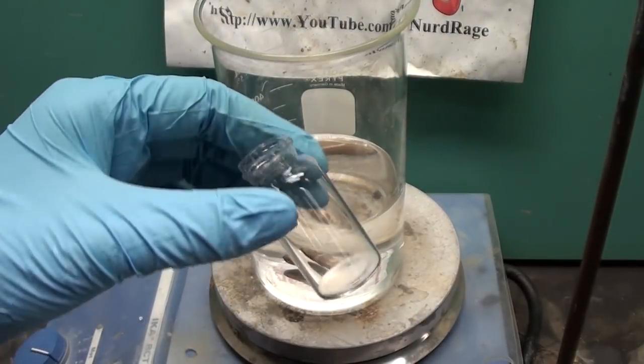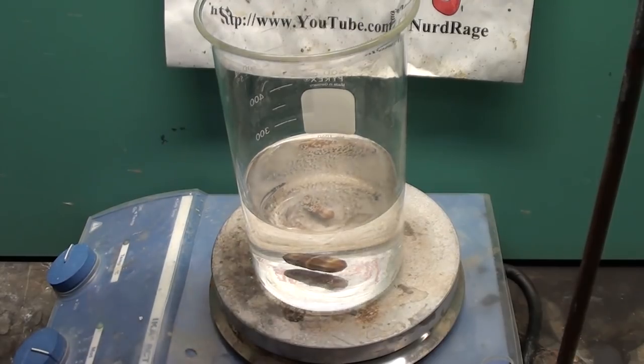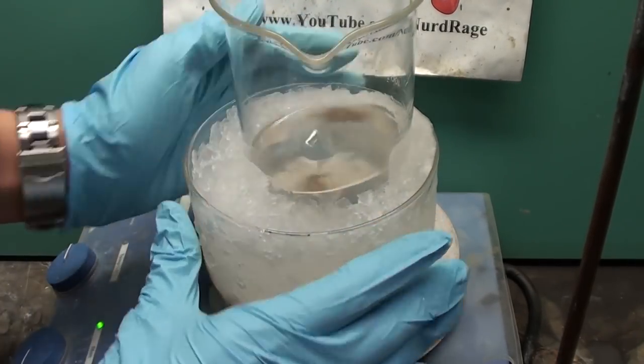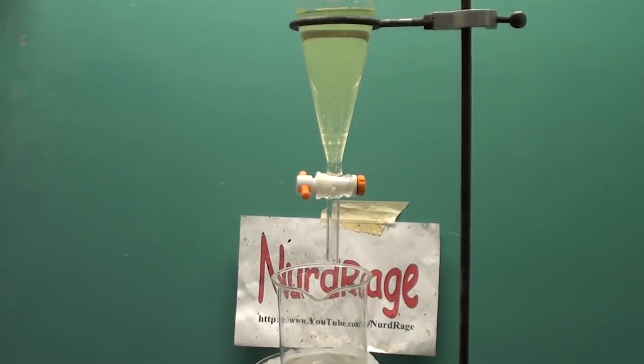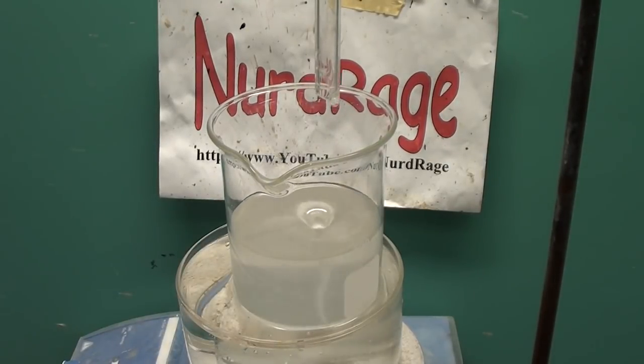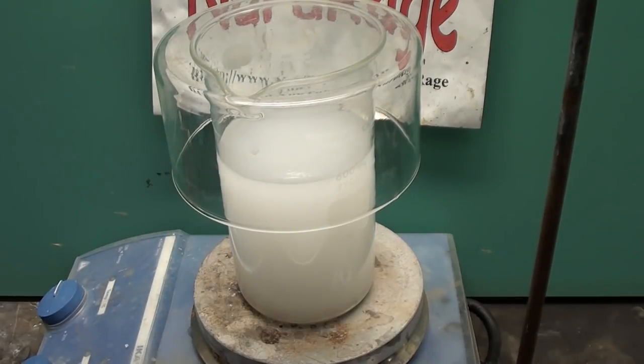First, 200mg of unflavored gelatin could be added to the ammonia at the beginning and stirred in. Second was to do the reaction while chilled in ice. And third was to add the bleach very slowly drop-wise from an addition funnel. These three things help to reduce side reactions and increase yield. The drawback is that things happen so much slower and the separation of the layers takes overnight.